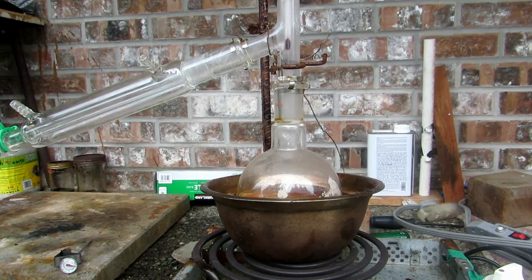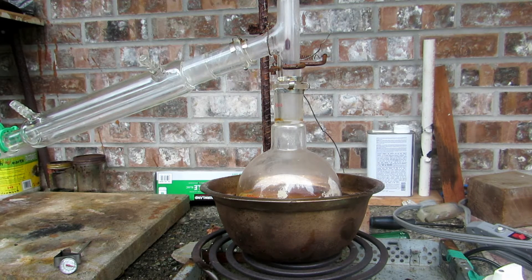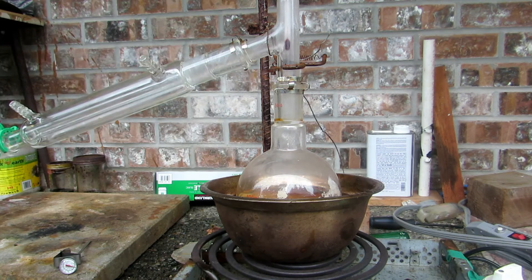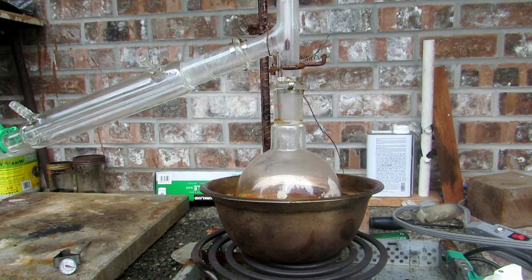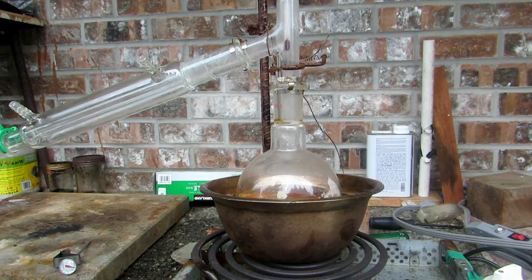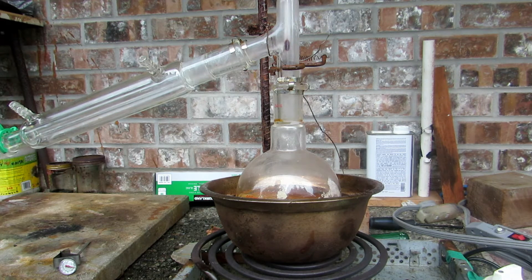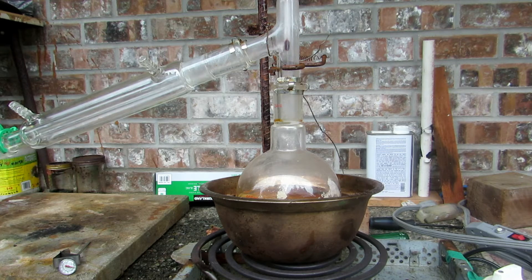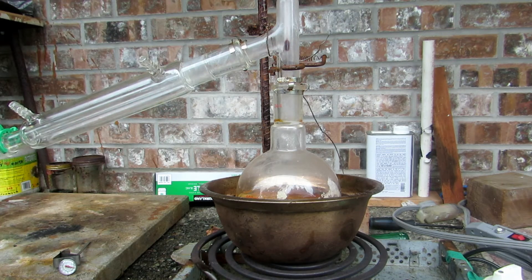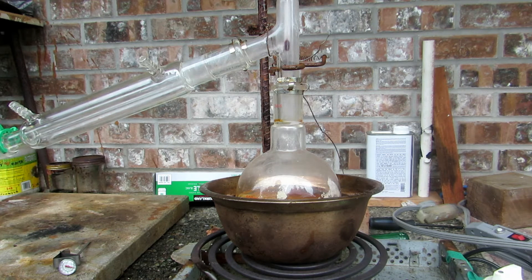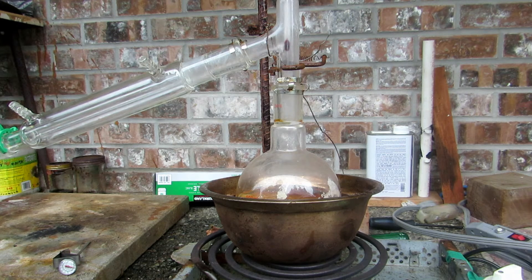One final thing that I really forgot to point out is it's very important to grease all your joints because nitric acid vapors can escape. And this leads to the second reason, nitric acid vapors are extremely corrosive. So we must use metal keck clips because plastic keck clips, such as this one here, will actually be vigorously eaten by the nitric acid fumes and will crack and fall apart in just a few seconds. It sounds a bit far-fetched, but I've done this in the past and that's exactly what happened. And my apparatus started to fall apart. So it's really important to use metal keck clips. And if you only use them at the heating part of it, that's totally fine. You can probably use plastic ones at the receiving end, which is what I've done. But if you only use plastic keck clips, this will definitely not work. And greasing your joints with oil will also help limit that amount of nitric acid fumes which escape.